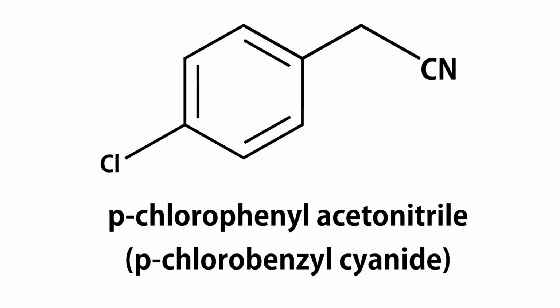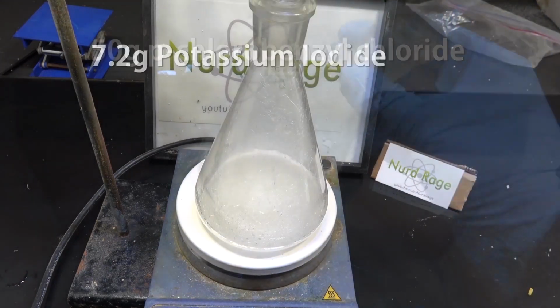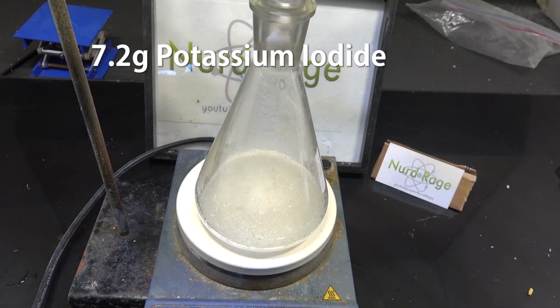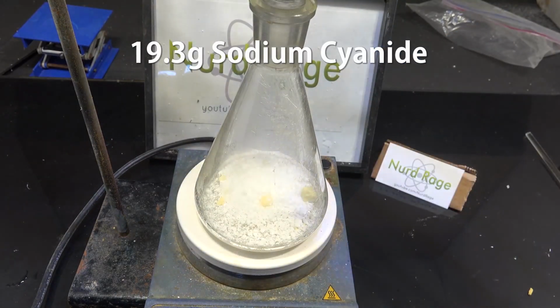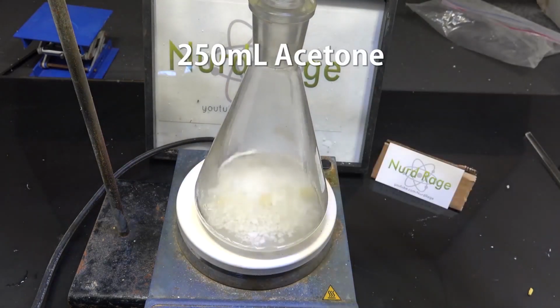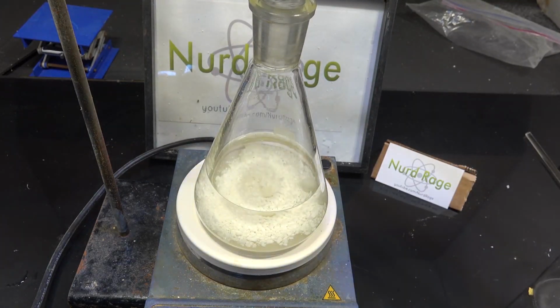We are now entering step 4 of making pyrimethamine, and to do that we need to make p-Chlorophenyl acetonitrile. First we get 50 grams of p-Chlorobenzyl chloride. Now to this we add 7.2 grams of potassium iodide. Now we add 19.3 grams of sodium cyanide. Then we add 250 milliliters of acetone that has been dried overnight with molecular sieves. Remember to add in a stir bar.